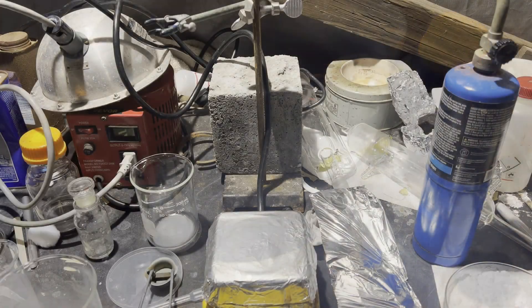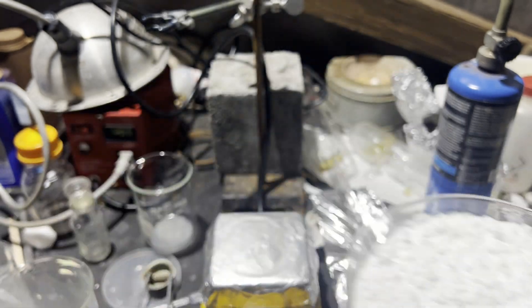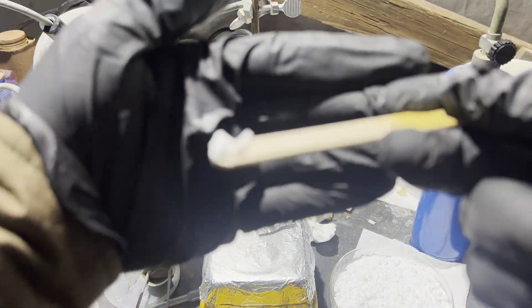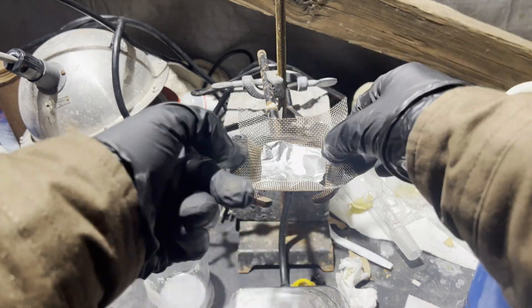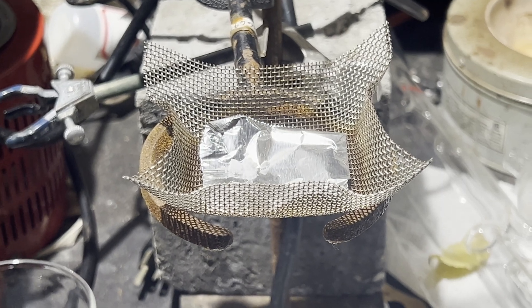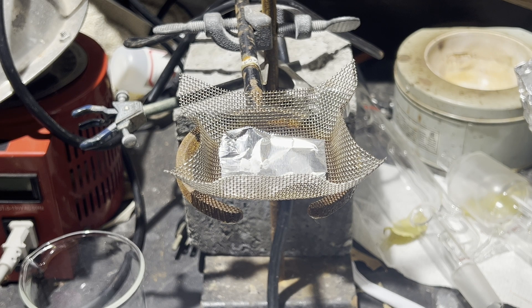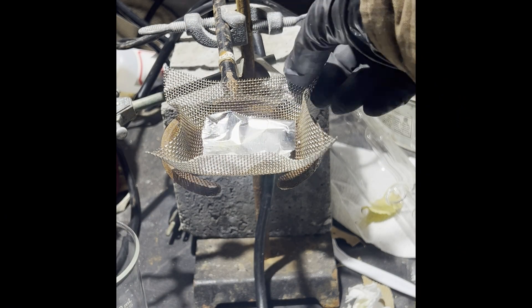Here it is before completely dry — 26 grams of the damp product. In these clips I test one of the more notable properties of benzoyl peroxide, which is its explosivity. Since it's a peroxide, organic peroxides are notoriously unstable. There's another one similarly used in the plastics industry — the peroxide derivative of methyl ethyl ketone, or 2-butanone, a commonly available paint stripper — but benzoyl peroxide is a bit safer and less sensitive to shock and temperature. I used at least half a gram in these clips, and what I had after the product completely dried and after what I used in the clips was 21.69 grams — so I'll say I ended up with about 22 grams.